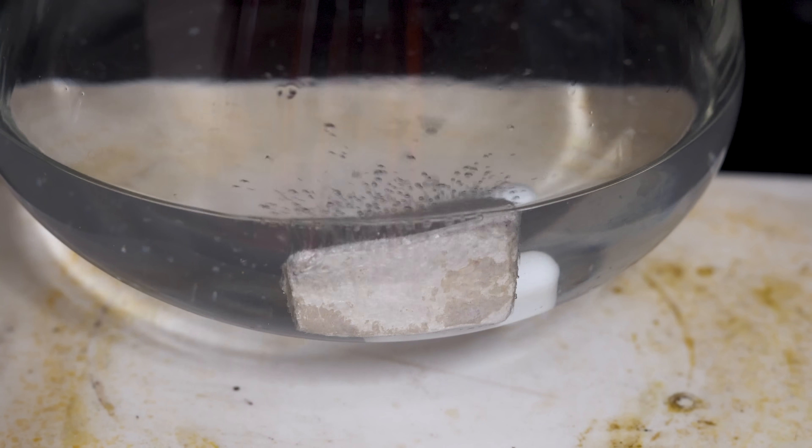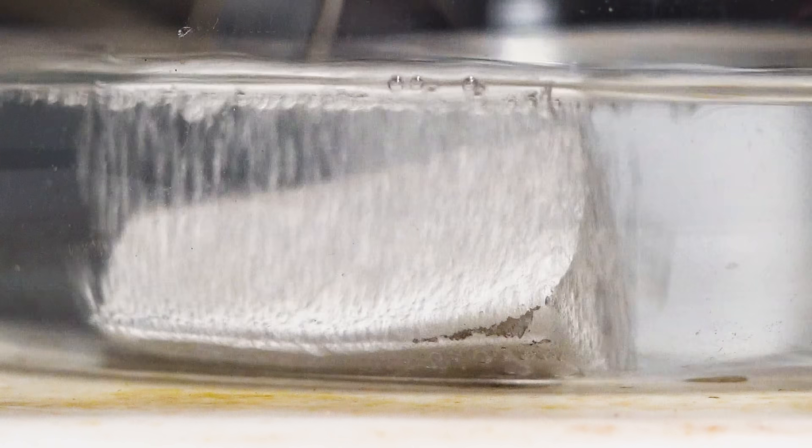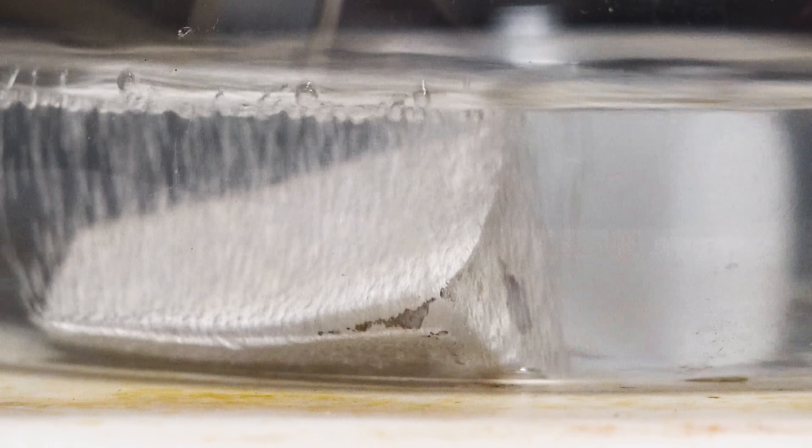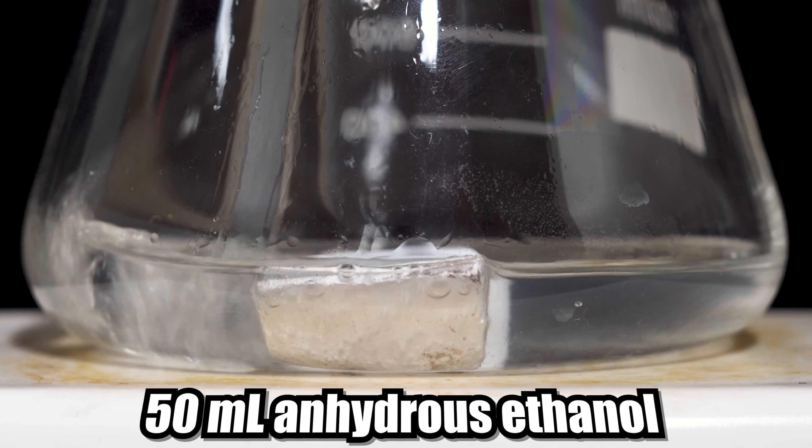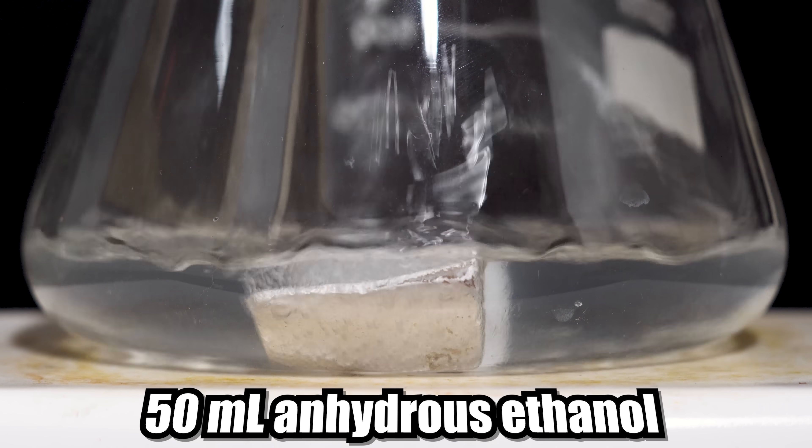I added some sodium to the flask and you can immediately see the evolution of hydrogen gas. Sodium can deprotonate a variety of alcohols and it makes the alkoxide anion. In our case, ethanol reacts with sodium to make the ethoxide anion and we have half a mole of hydrogen gas come out. There was no set amount of ethanol to be used and I just kept adding until everything was dissolved.